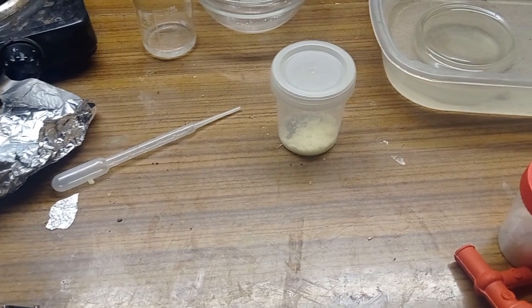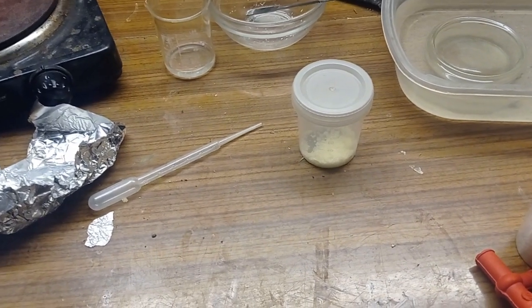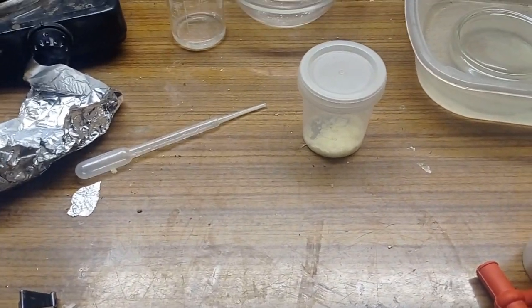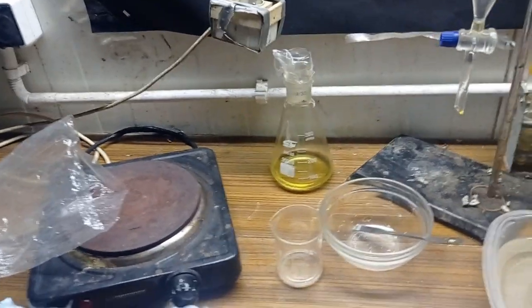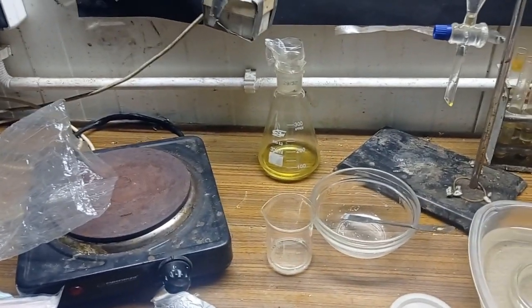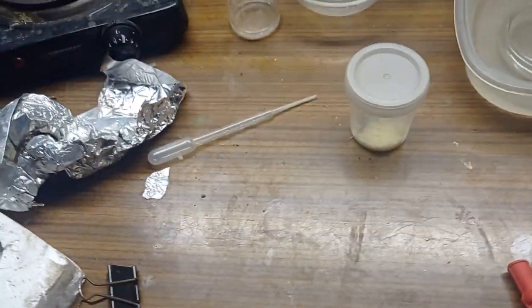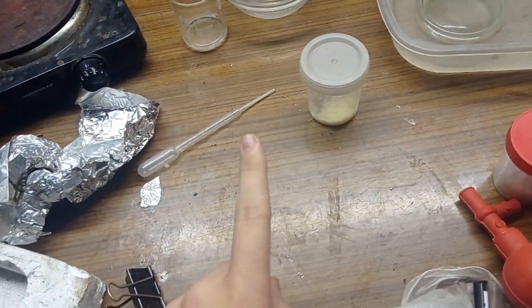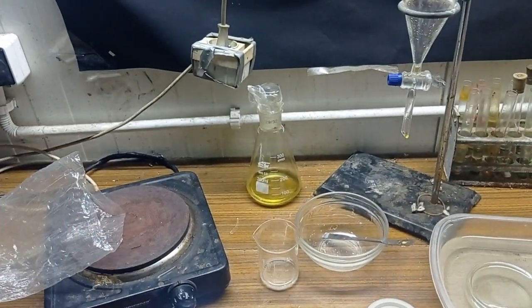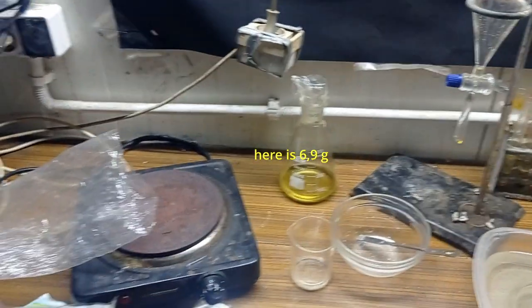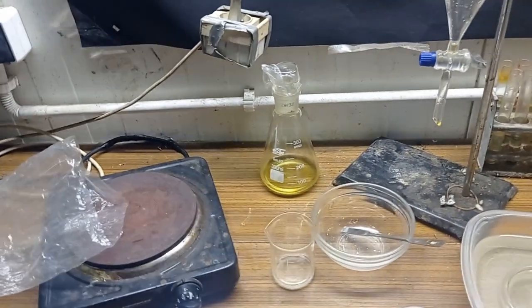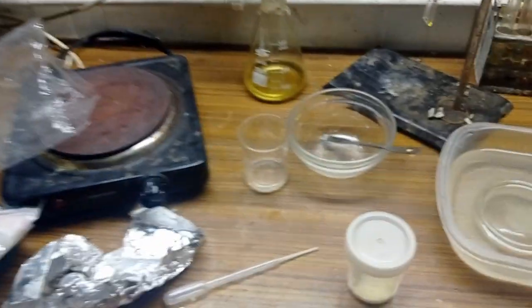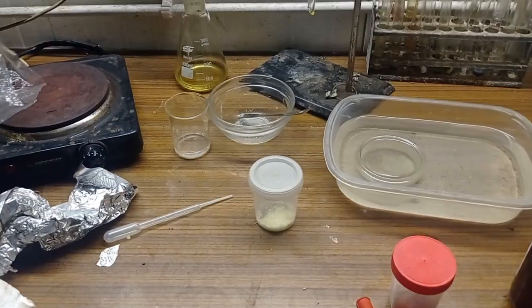So ortho-nitrotoluene should be around twice as much. The correct proportion is 32% of para-nitrotoluene, 64% of ortho-nitrotoluene, and 3% of meta-nitrotoluene.